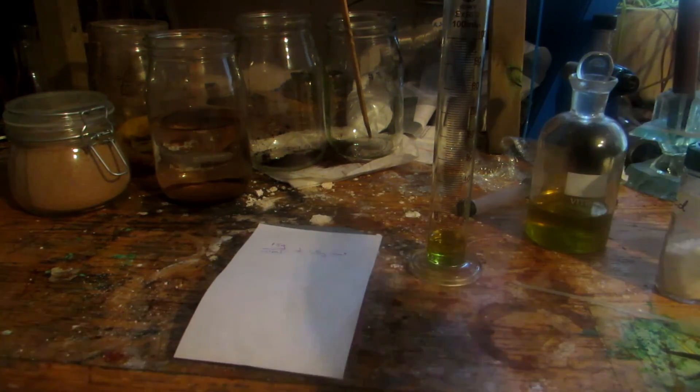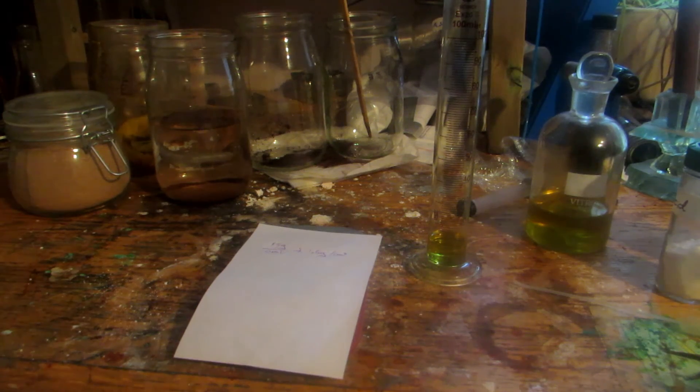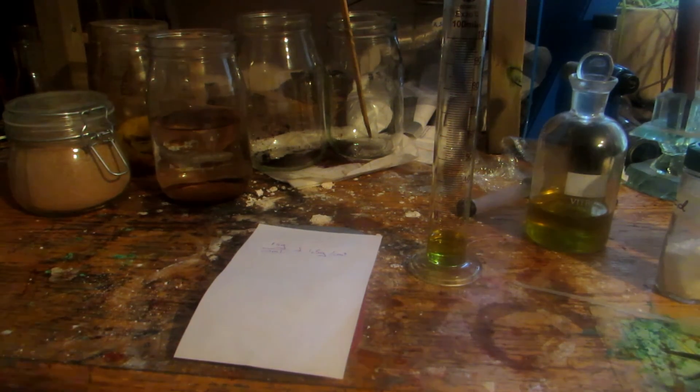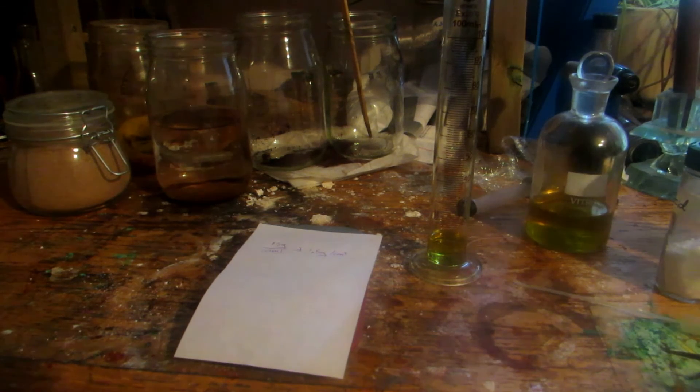Now this must be stored very carefully. If this would knock onto something that would react with it poorly, and there's a lot of things that react poorly with concentrated nitric acid, if this were ever to happen you'd have a serious, serious issue on your hands, especially if there was an earthquake or something. So be very careful where you store your concentrated nitric acid. Anyhow, so I'll get the rest of my glassware in and show you exactly what it did to it.